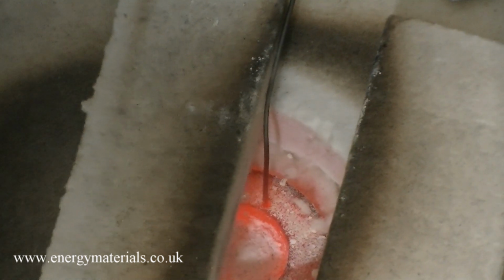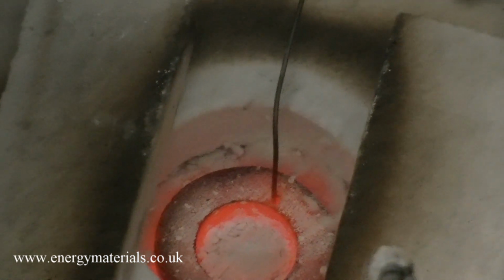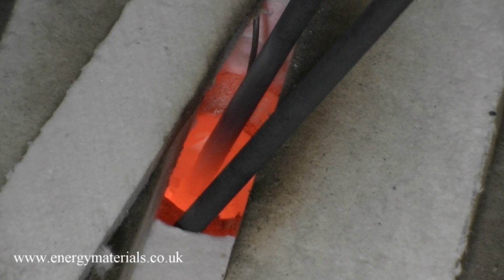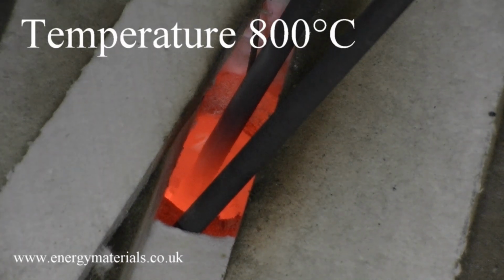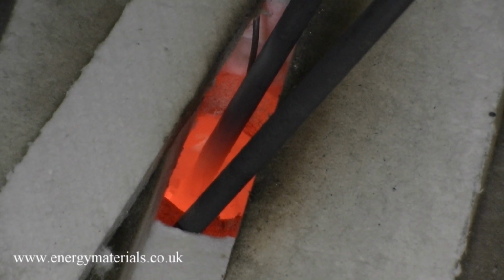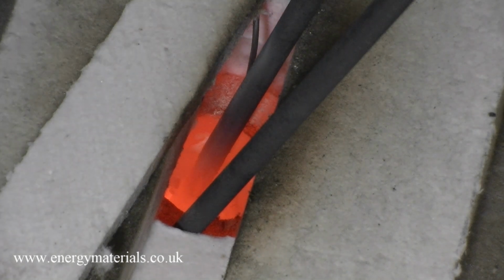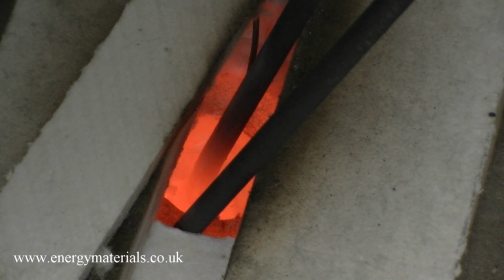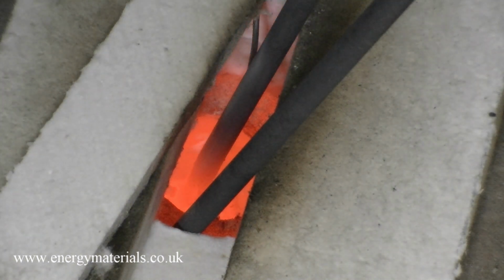With the salt in a mushy state, it didn't really melt, possibly forming magnesium oxide at elevated temperatures. A graphite electrode was submerged in the salt and about 4 amps of DC electric current passed through. There was a definite chlorine smell when the current was flowing, possibly indicating that we are indeed forming magnesium metal.